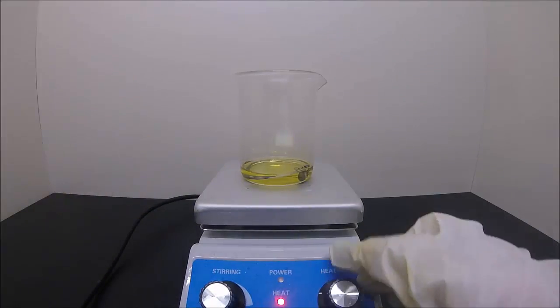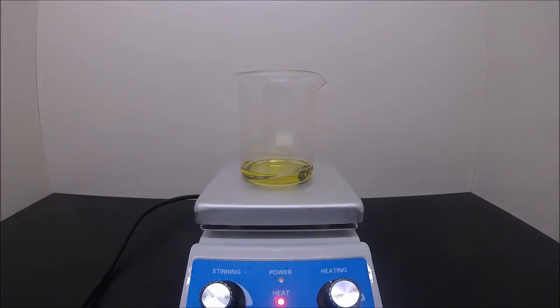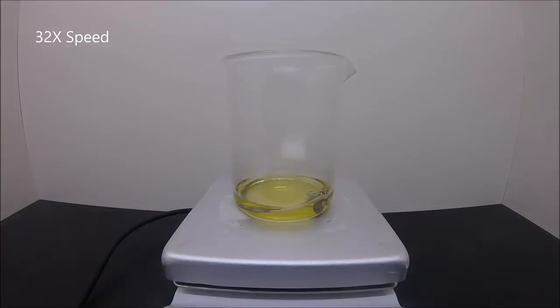Let's check the connections. Well, everything is good. Adjust the heater to low heat, as too much heat is going to degrade our product. And let's sit there and wait.